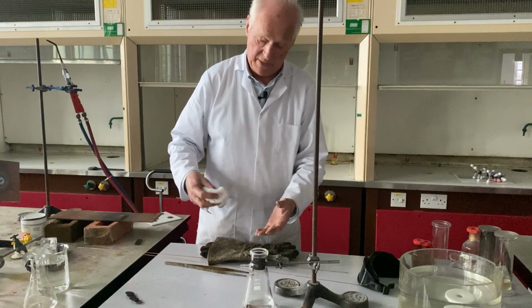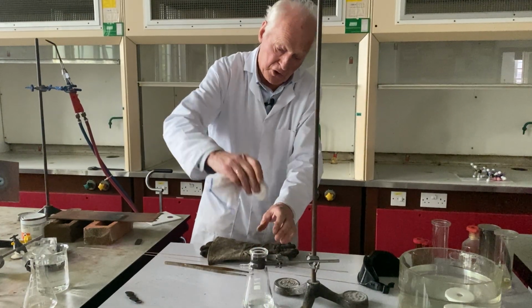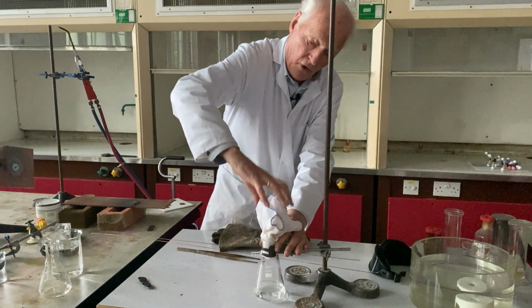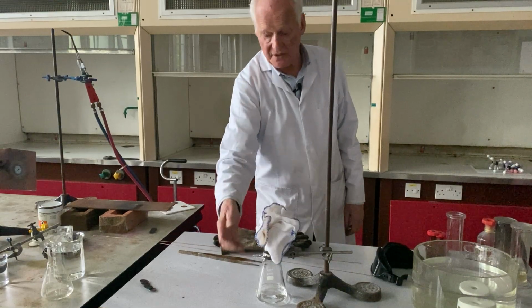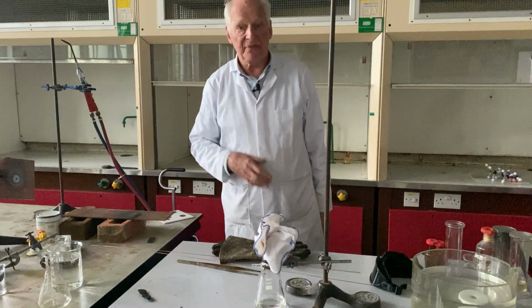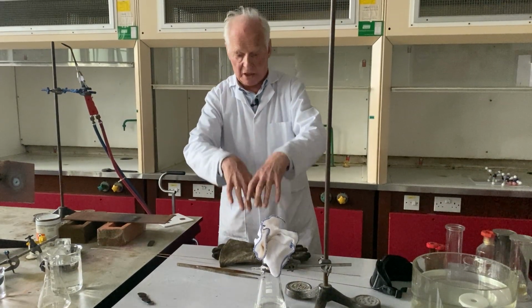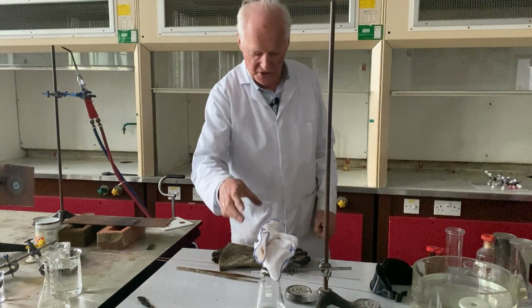And when that tiny amount of acetylene has started to be produced, I'm going to plug the hole here with this cloth, you see. What I'm then going to do is apply a lighted flame there, and hopefully the cloth will just pop out. And that will be the final demonstration. There's no bang involved, it'll just be a little pop with a little bit of a flame. So fingers crossed this will be successful.